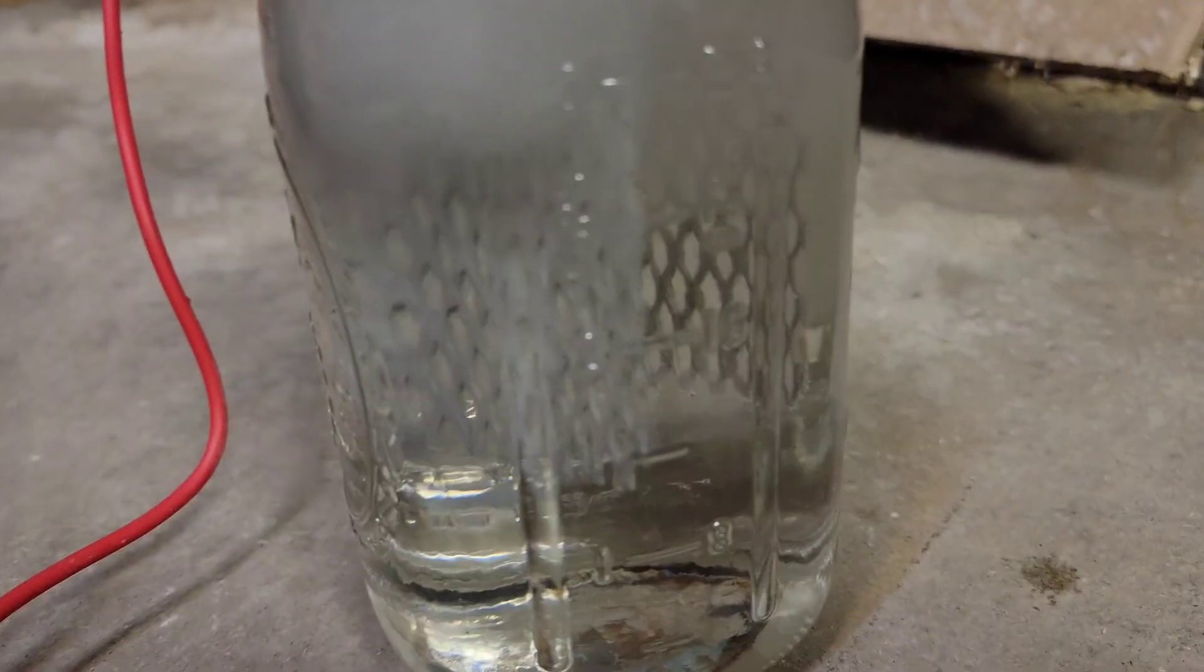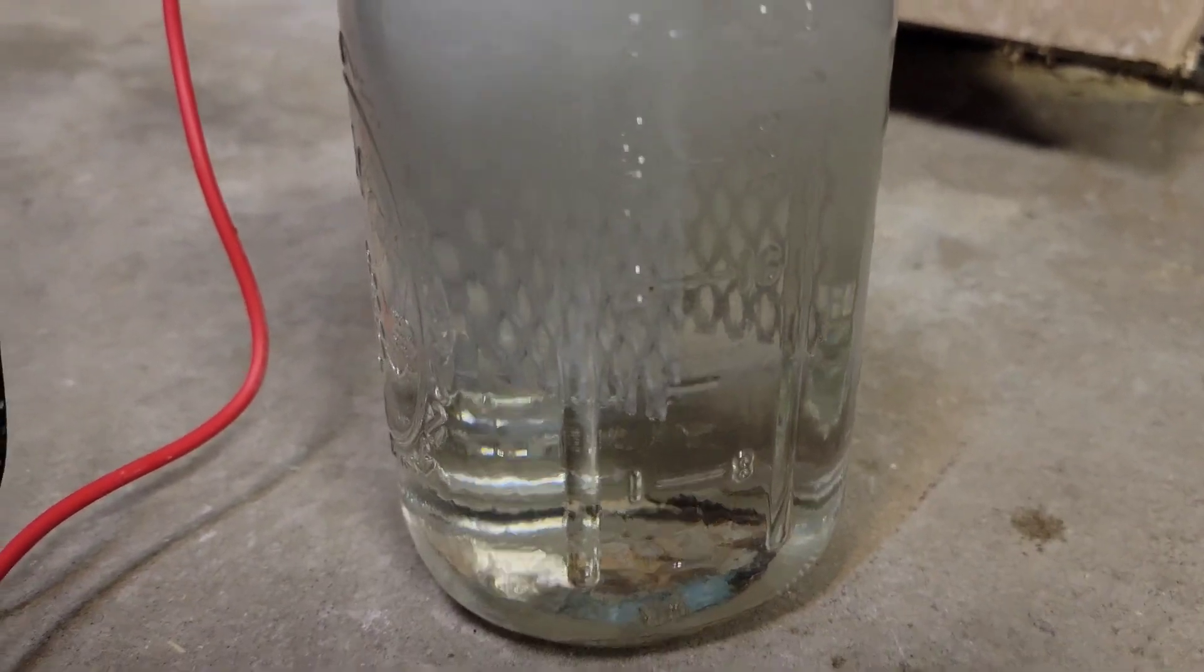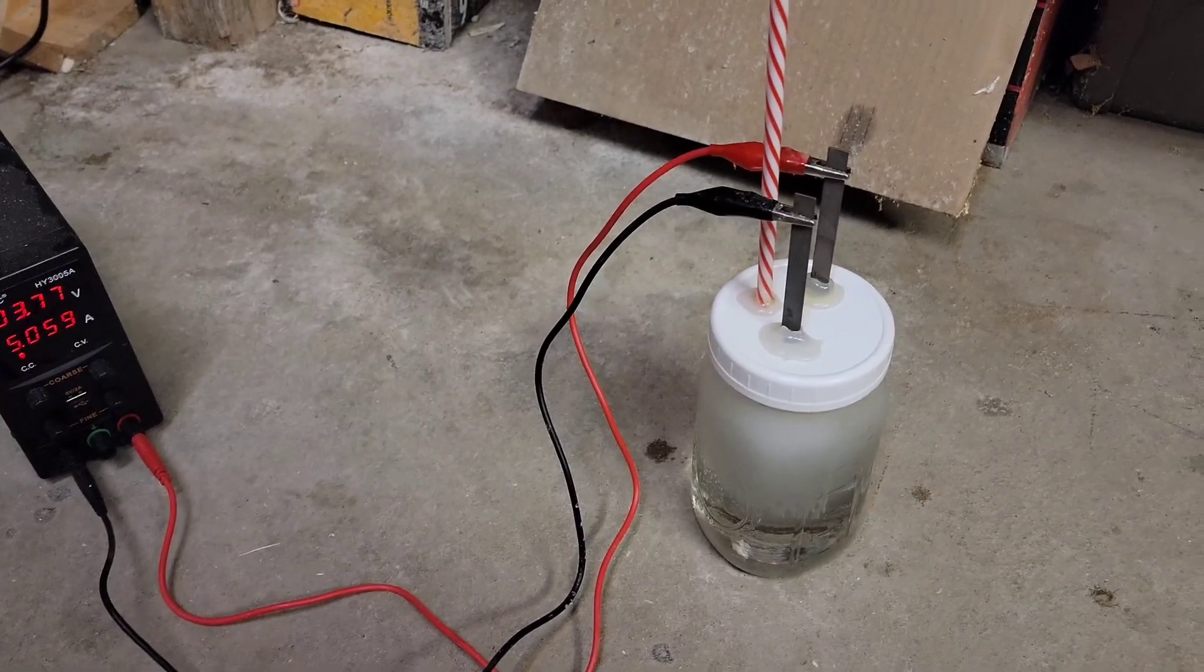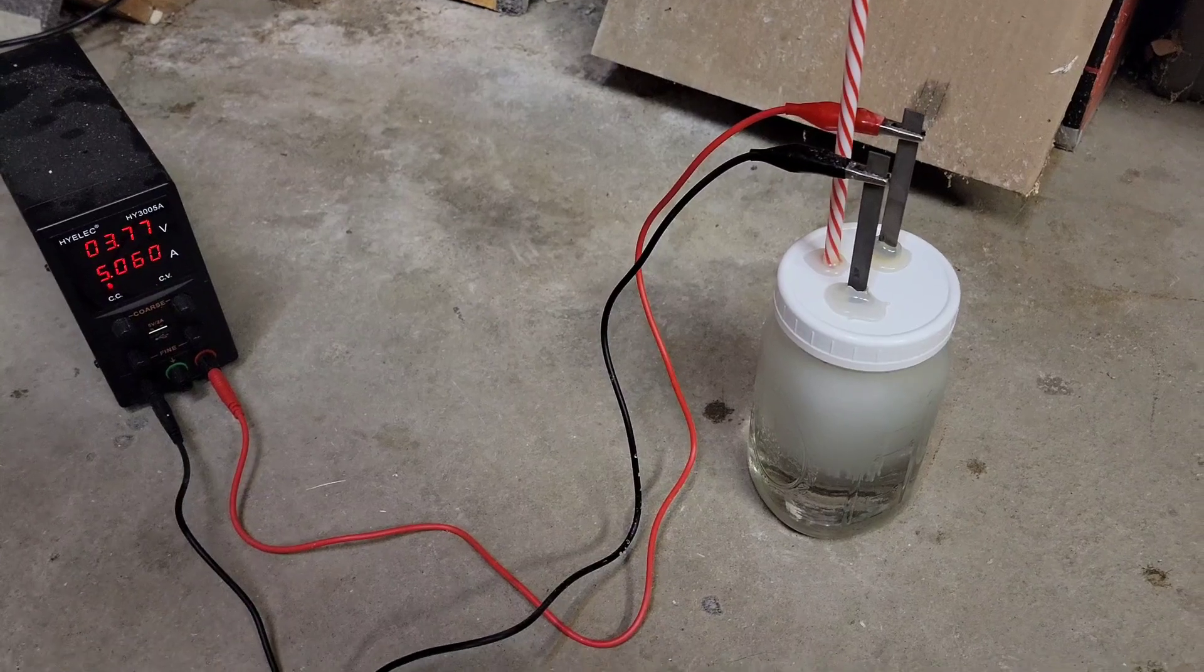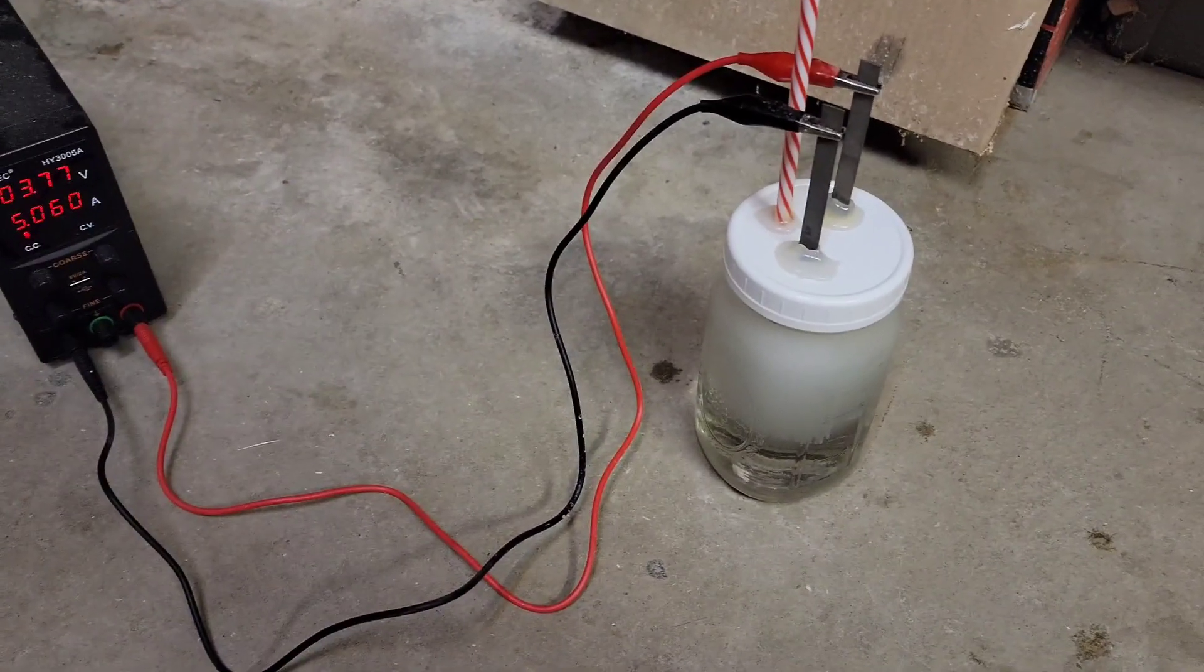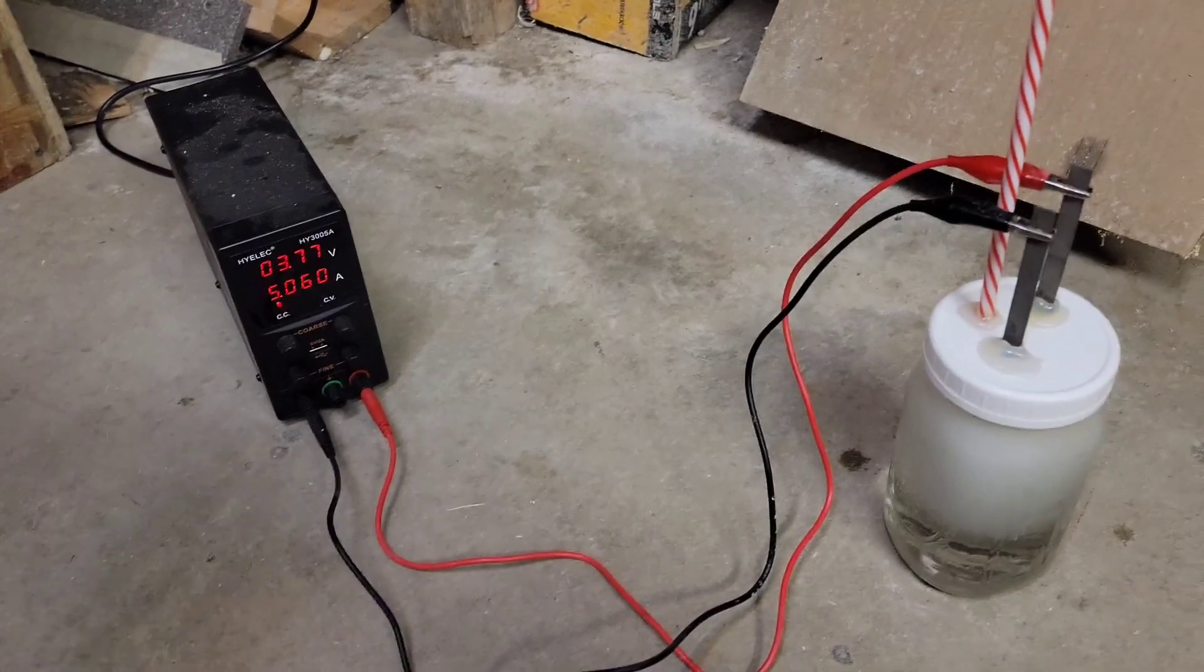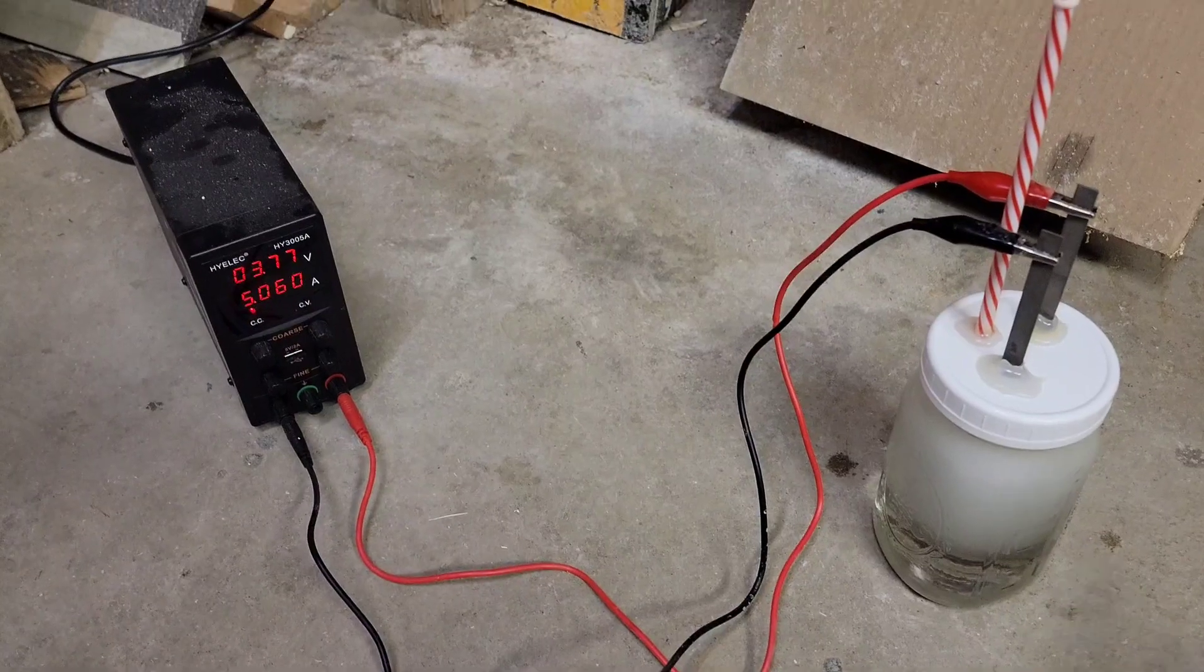So now I just have to leave this for a little bit. There's a website I will show you guys later too. On the website you're able to input how much salt you put in your solution and it will calculate based on the amperage that you're putting into the solution about how long it'll take for your cell to finish.